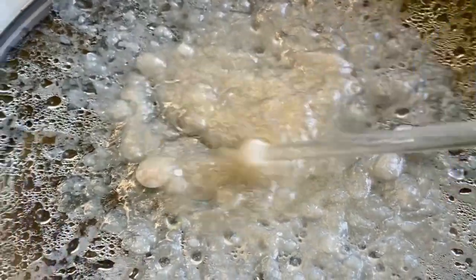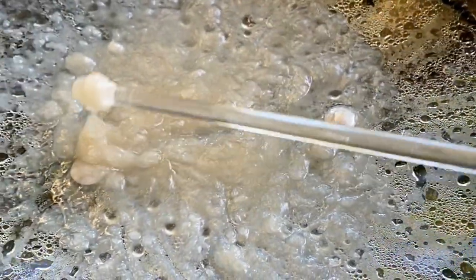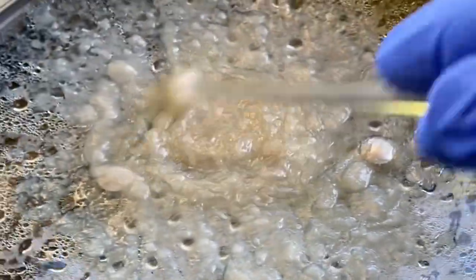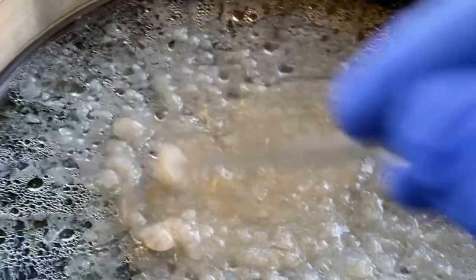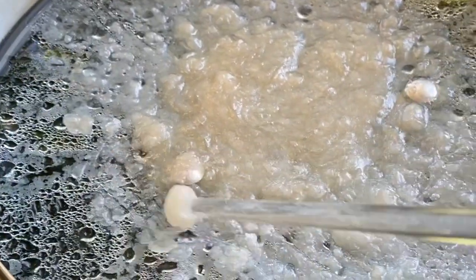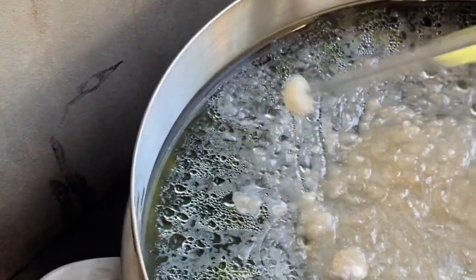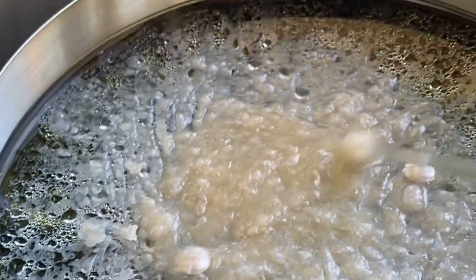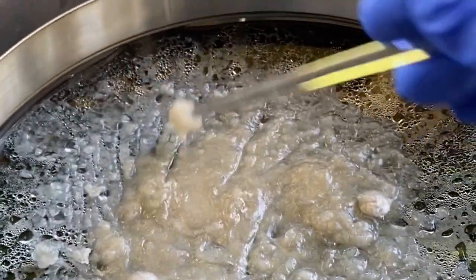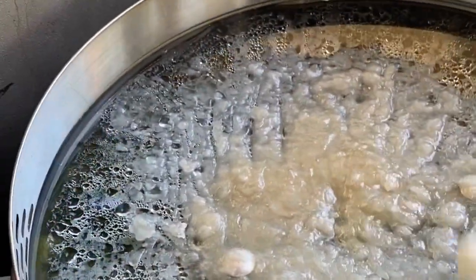I turned the heat off, and now it's beginning to solidify, and it's turned into this goofy semi-gelatinous mass. And so we're just going to keep moving it around until it's fully resolidified, so that any excess toluene gets pushed out. It reeks of toluene right now, so I guess that means we're doing it right. I'm glad that this worked, because I didn't have any other way to perform this. So it should be good. I'll come back to you when it's fully solidified, and we'll weigh it and see how many grams we got.